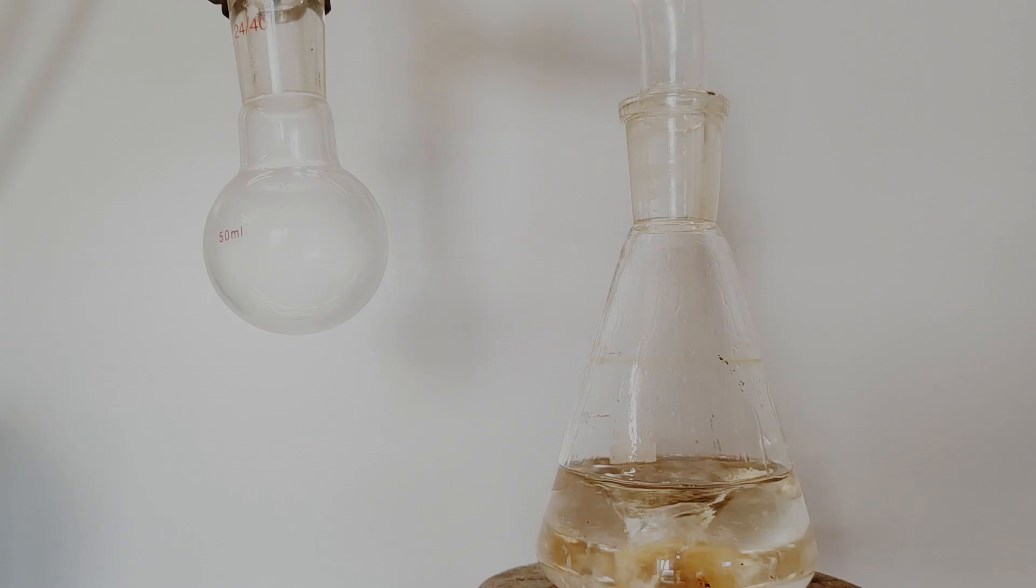We now have our reaction mixture, and we have to get rid of the water which is formed as a byproduct to drive the reaction to completion.